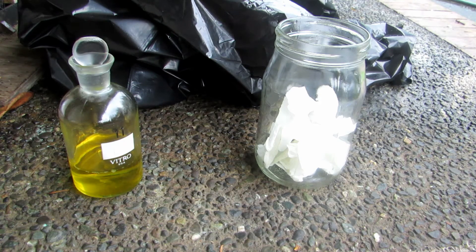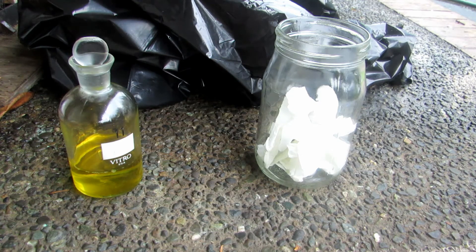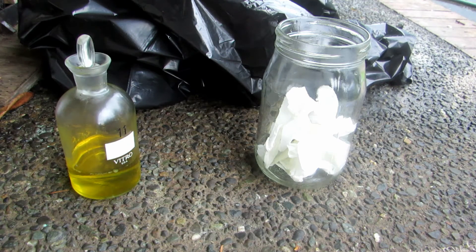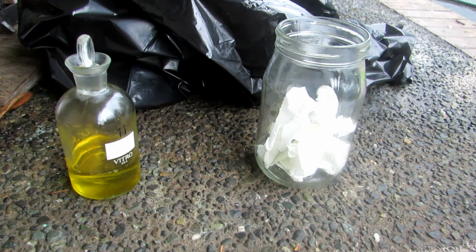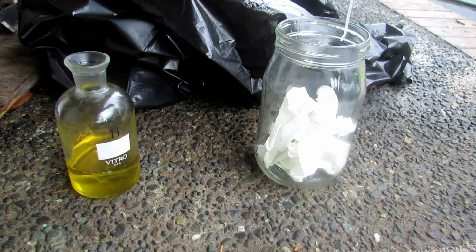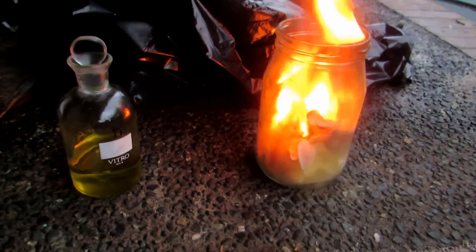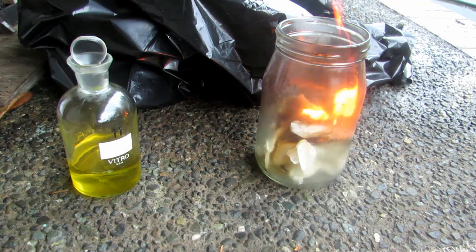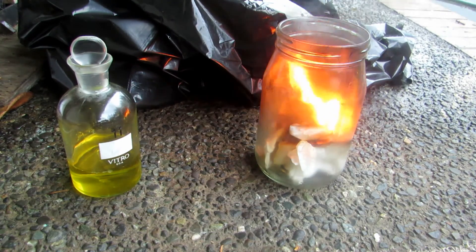Okay, so I just quickly took off the receiving flask. We can do a bit of testing. We'll let the rest of the apparatus cool. Now this could give us some ideas of the percentages. Now highly concentrated nitric acid fumes when you blow onto it. So we could try that. I think I saw some white fuming there. So it probably means it's above 85%. And the other thing is it's very reactive to many types of gloves, as I mentioned before. So here's some normal gloves which I would have worn, which I'm not, because apparently it can react vigorously with them. So we'll just see what sort of reaction happens. If we take a bit of this and, oh my, oh whoa. Holy. Yeah. That's why we don't put concentrated nitric acid on our gloves. Because, ouch. That would not be good. If you got it on your skin, you get a bad burn. But then having molten burning gloves on your hand, that would be even worse. No wonder we don't. Anyhow, I'll extinguish this and then I'll meet you back.